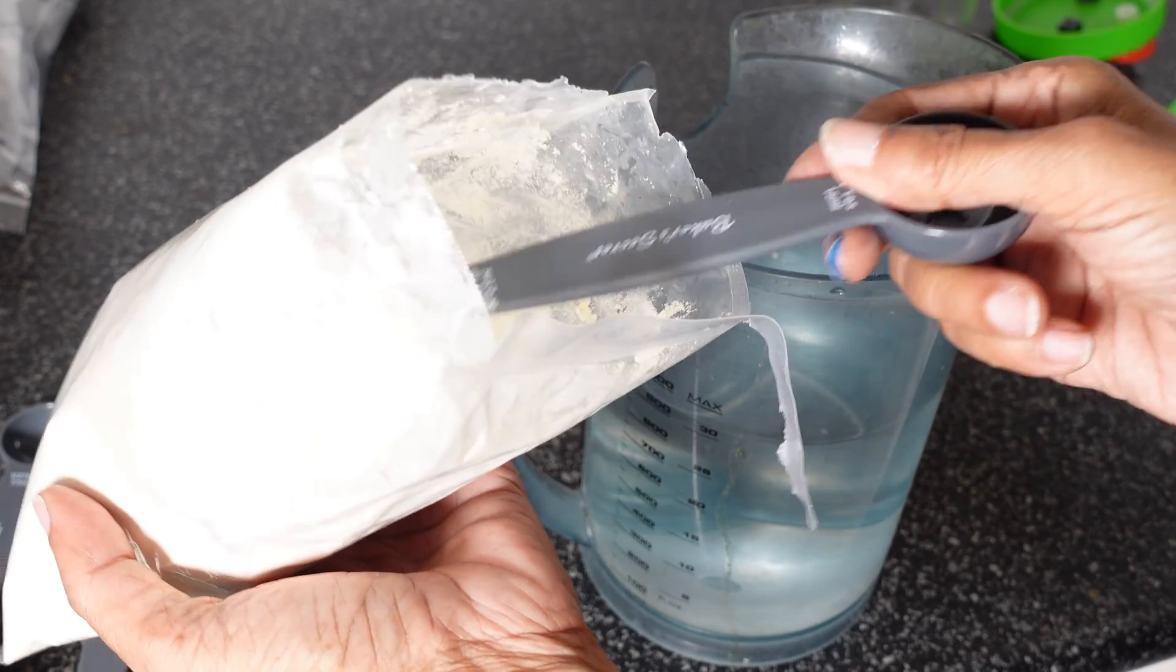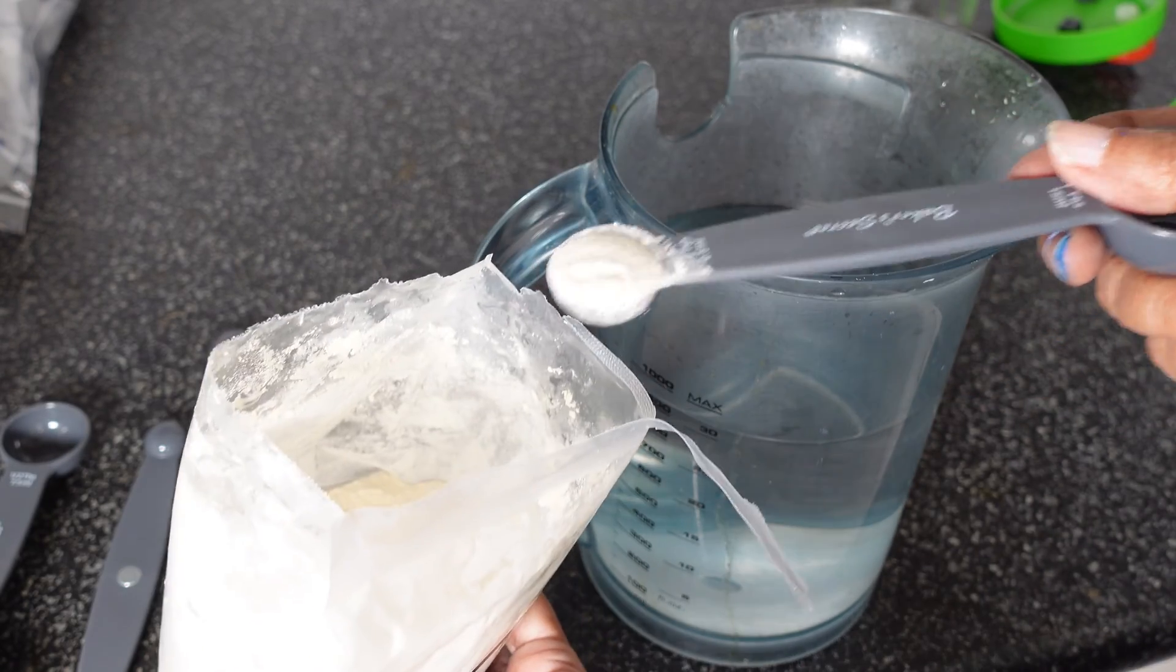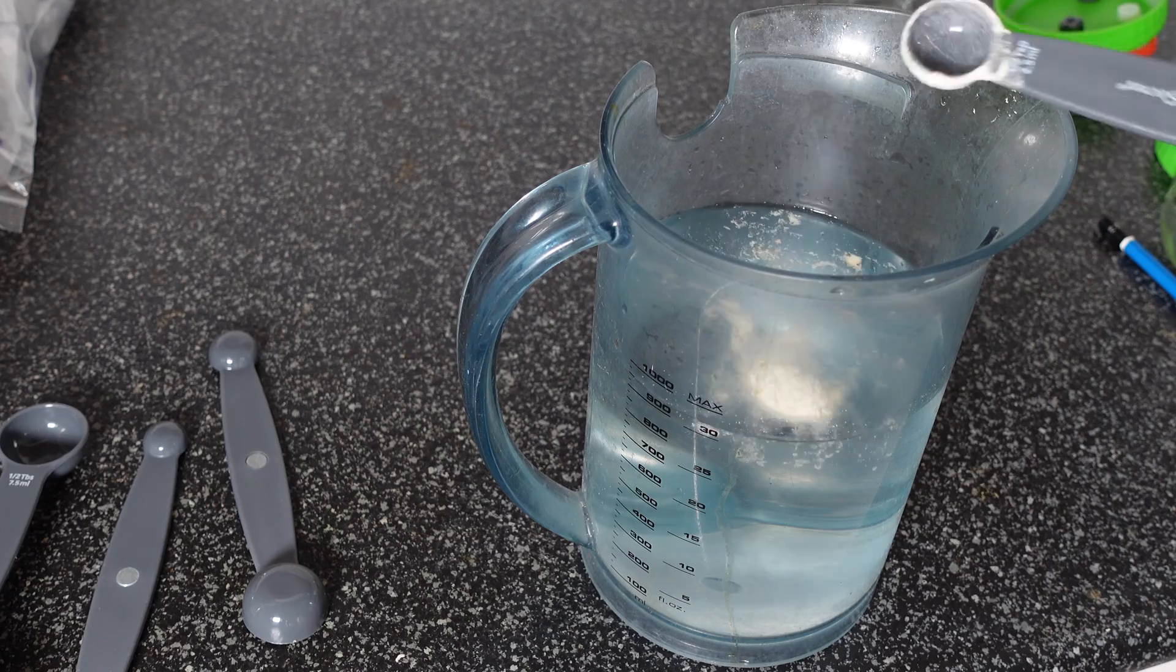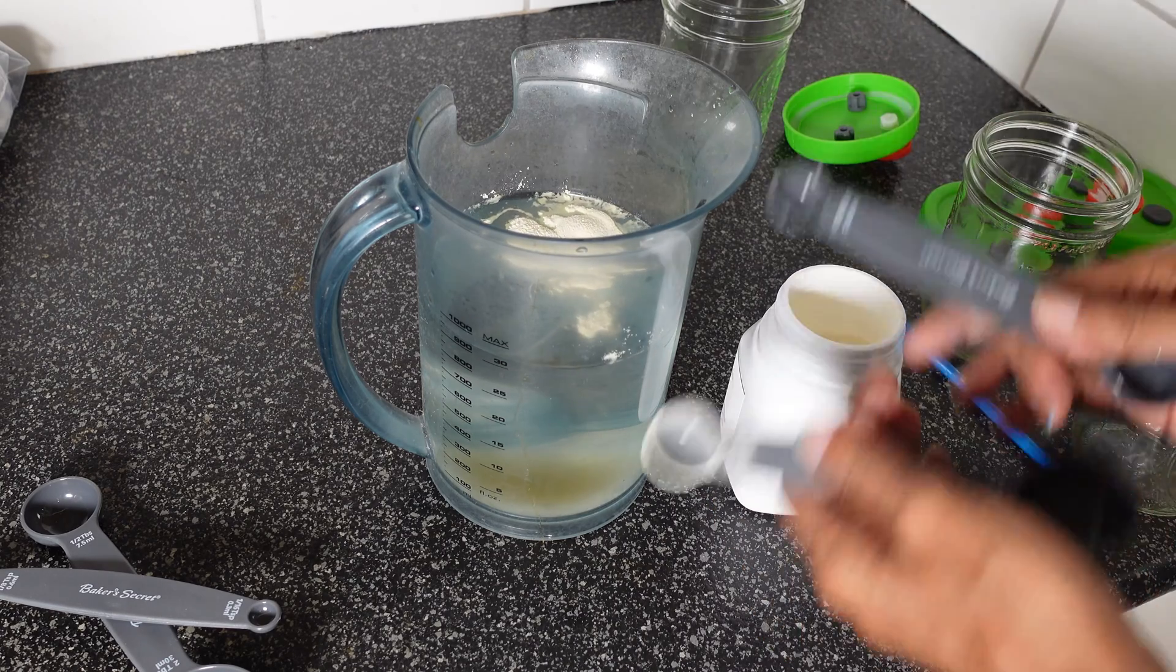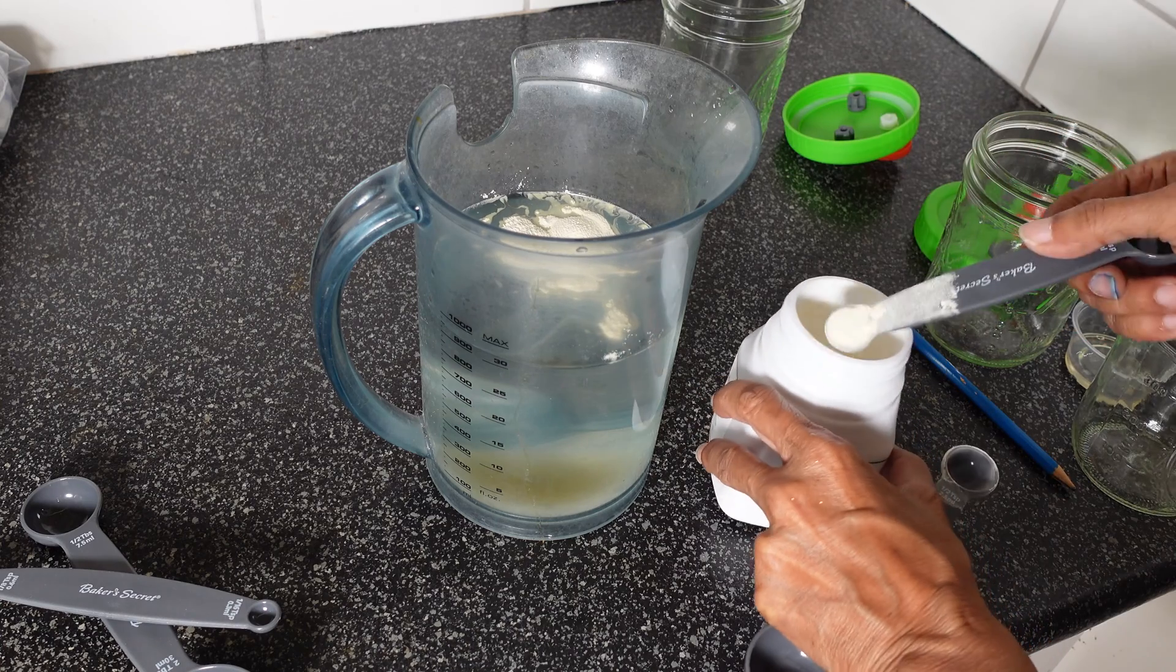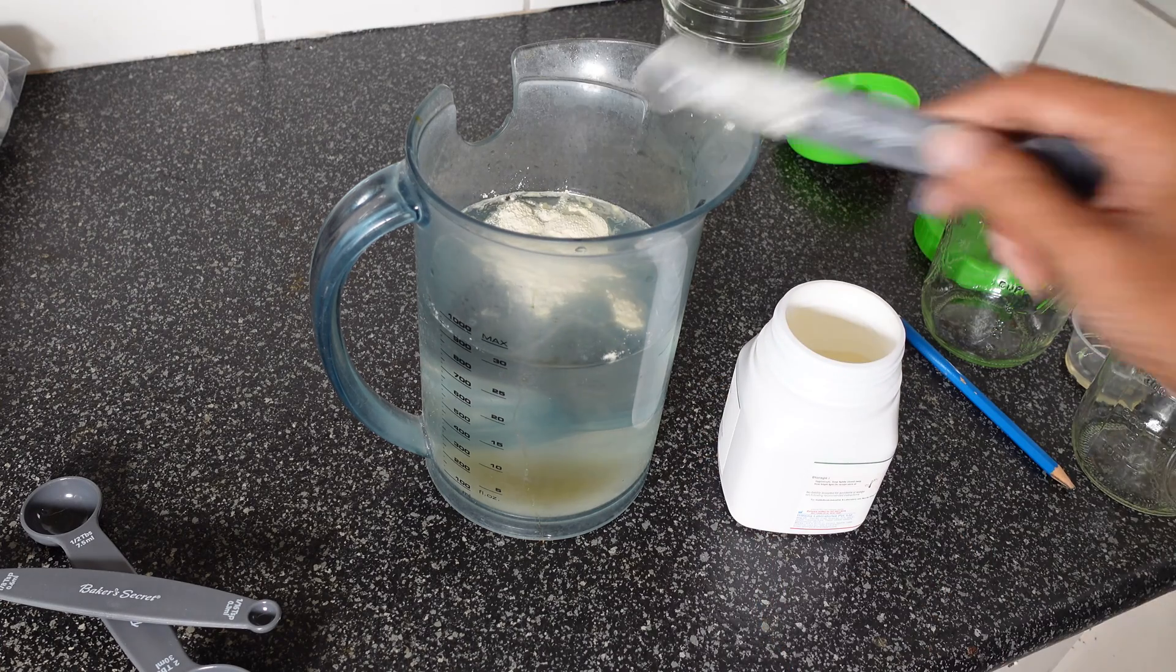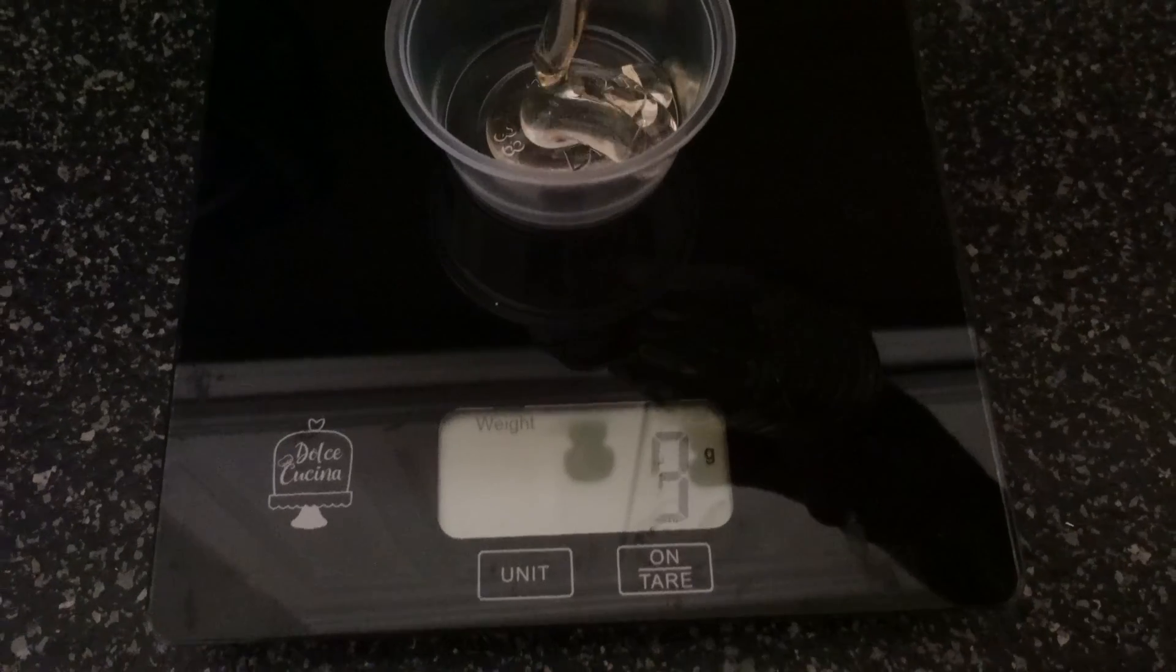To 900 milliliters of filtered warm water I added half a teaspoon of light malt extract, three quarter teaspoon of peptone, and 30 grams of corn syrup.